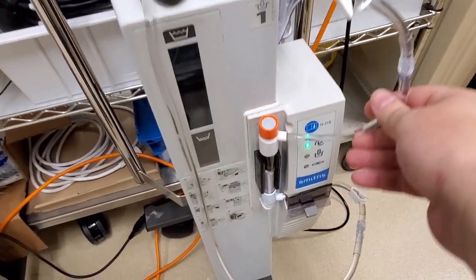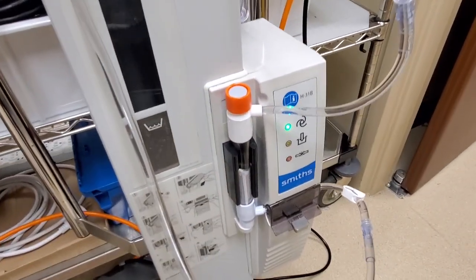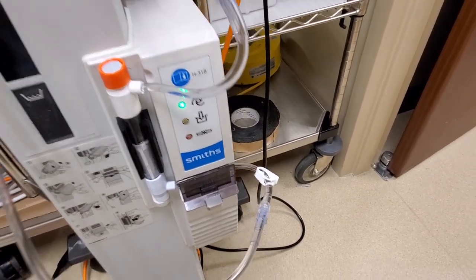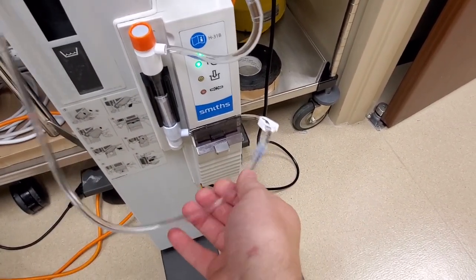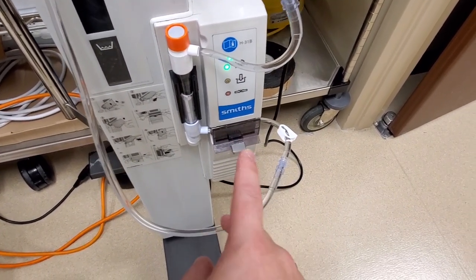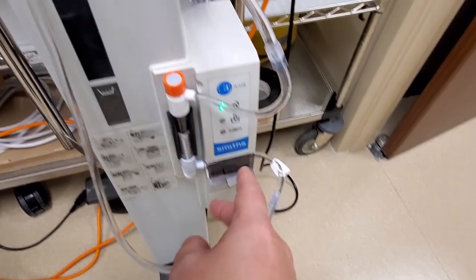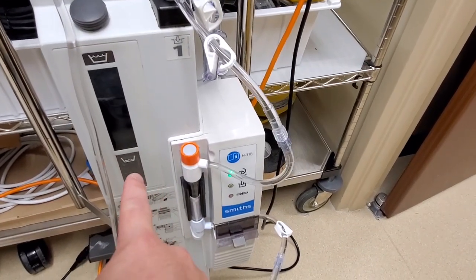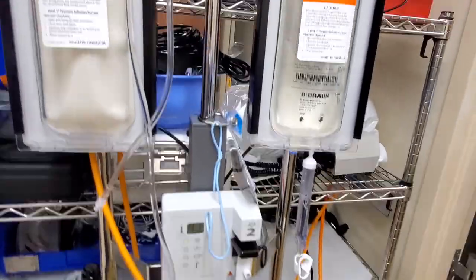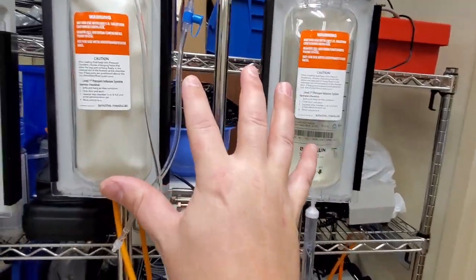Comes down here, we have a bubble catcher, a drip chamber. And down next to it, that Smiths, that is a pinch valve. And I'm not really sure if this is an ultrasonic and detects air bubbles or not. But it is a pinch valve, so if this guy gives any air or fluid out, it clamps off your patient line so that you're not going to have to bleed out the air next time you load a saline.